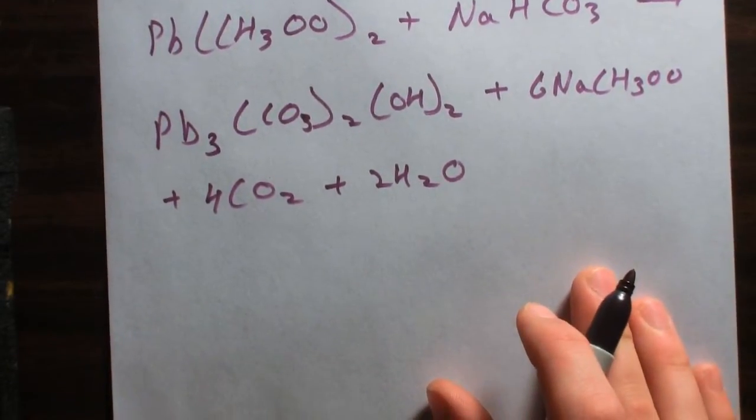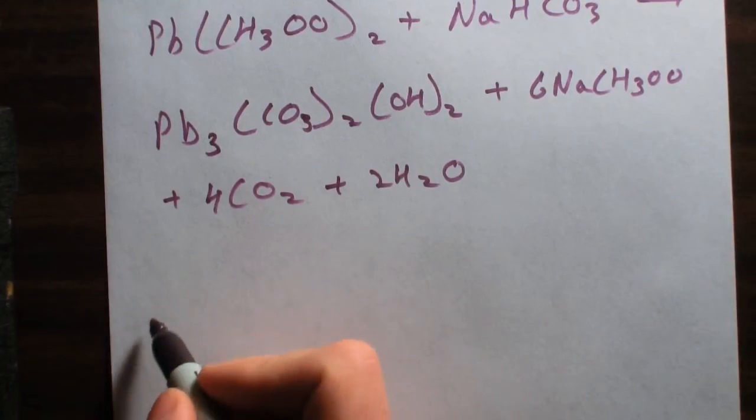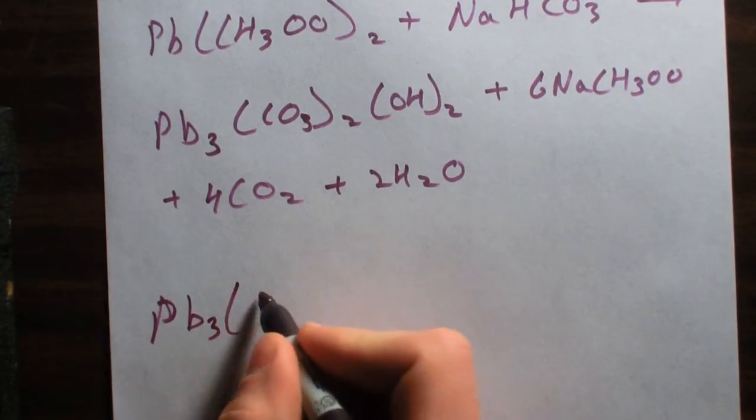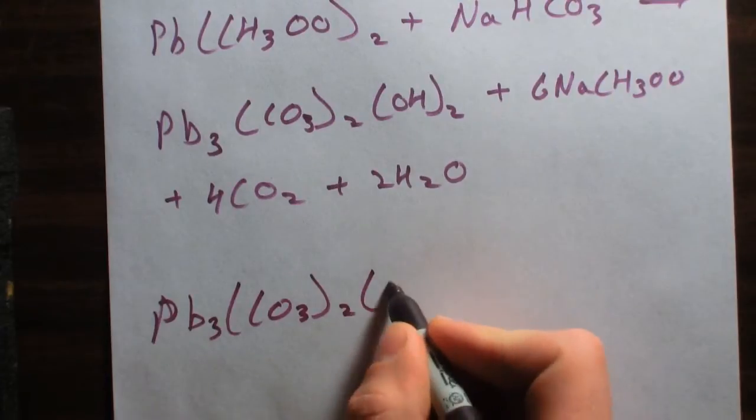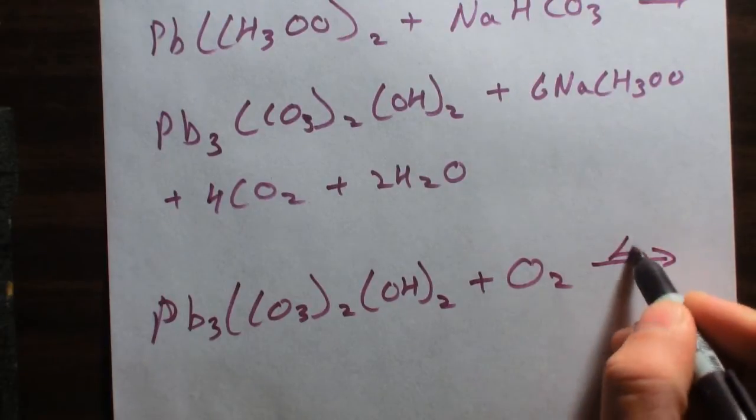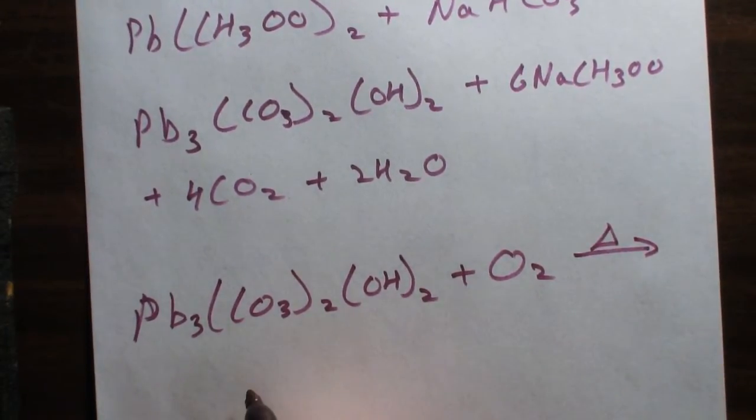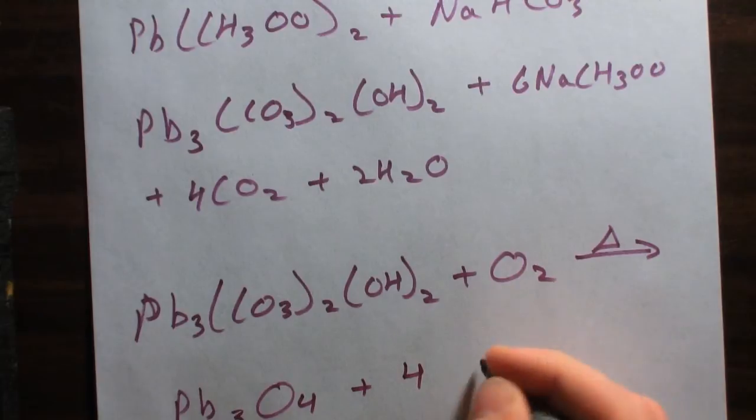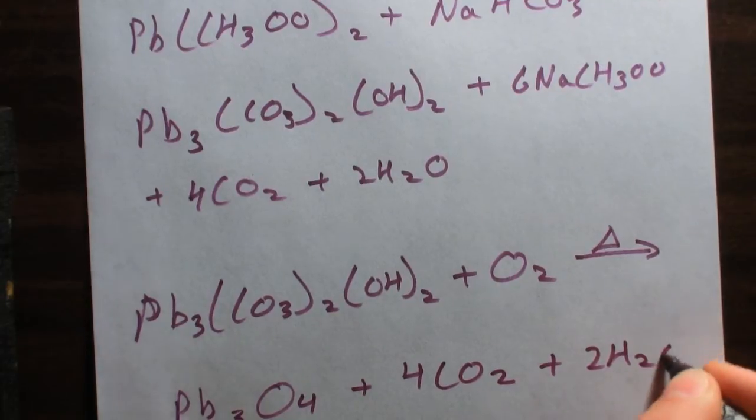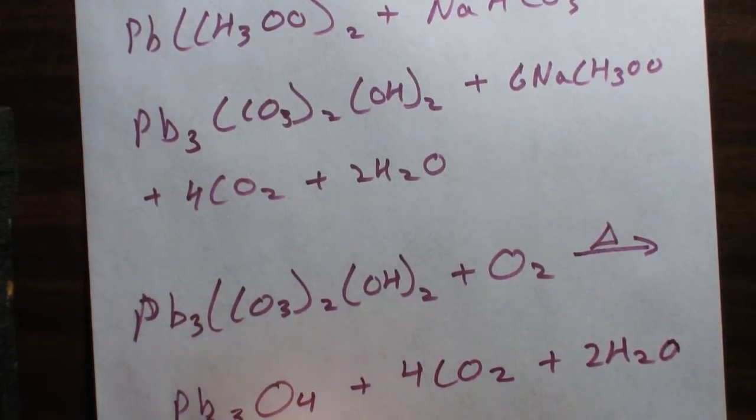So the last reaction I'm going to show today is the conversion of basic lead carbonate into lead tetraoxide. So we're going to take this plus oxygen, introduce some heat, and this is going to convert into lead tetraoxide.